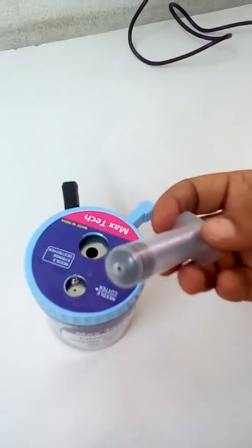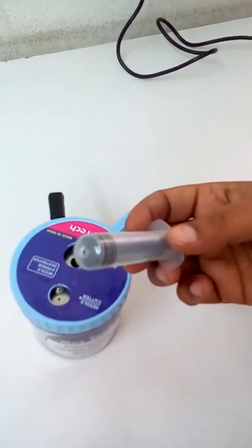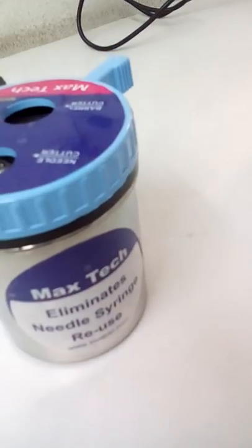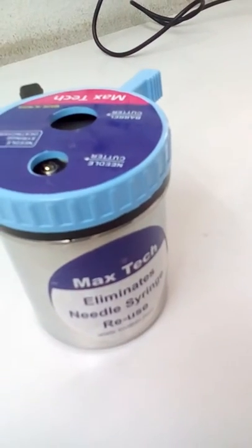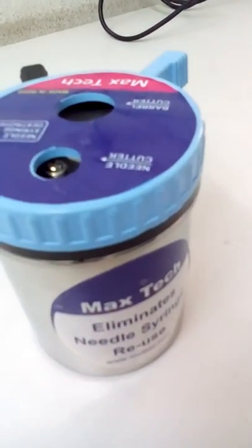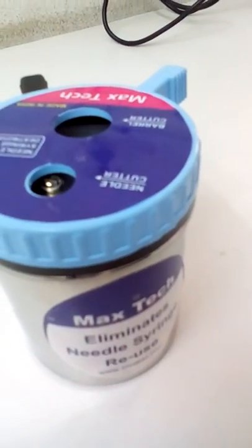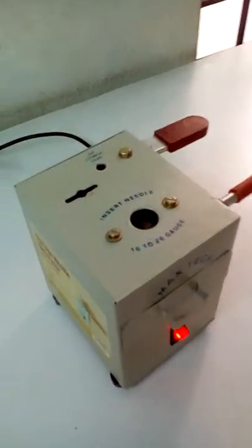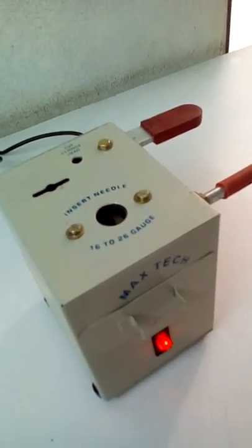So both the nozzle and the needle have been destroyed. This has a stainless steel body, so even if the needle or syringe head contains blood, steel being bactericidal will prevent any microbial growth.